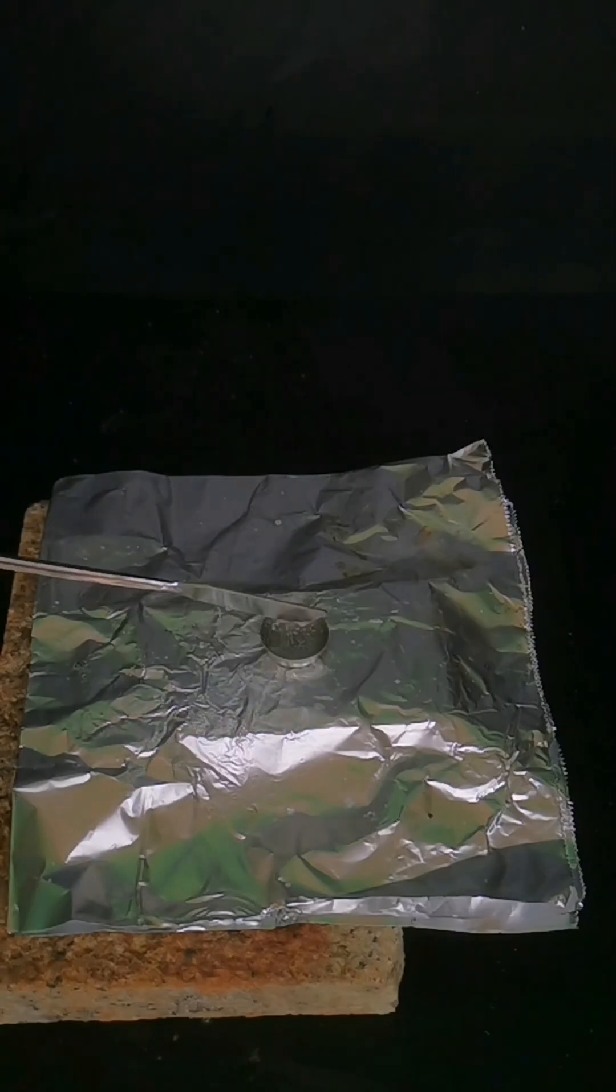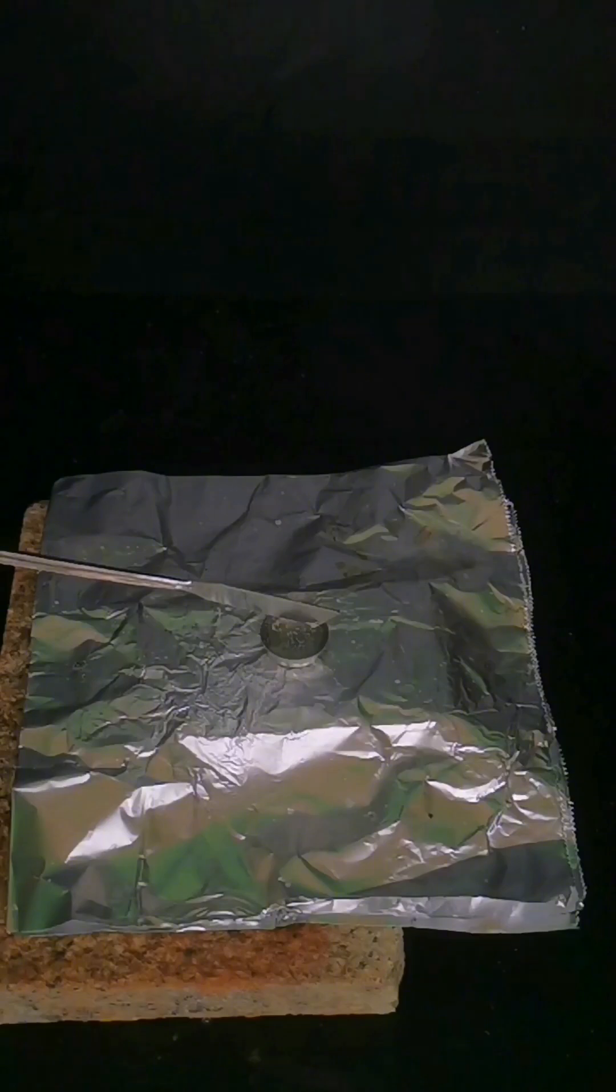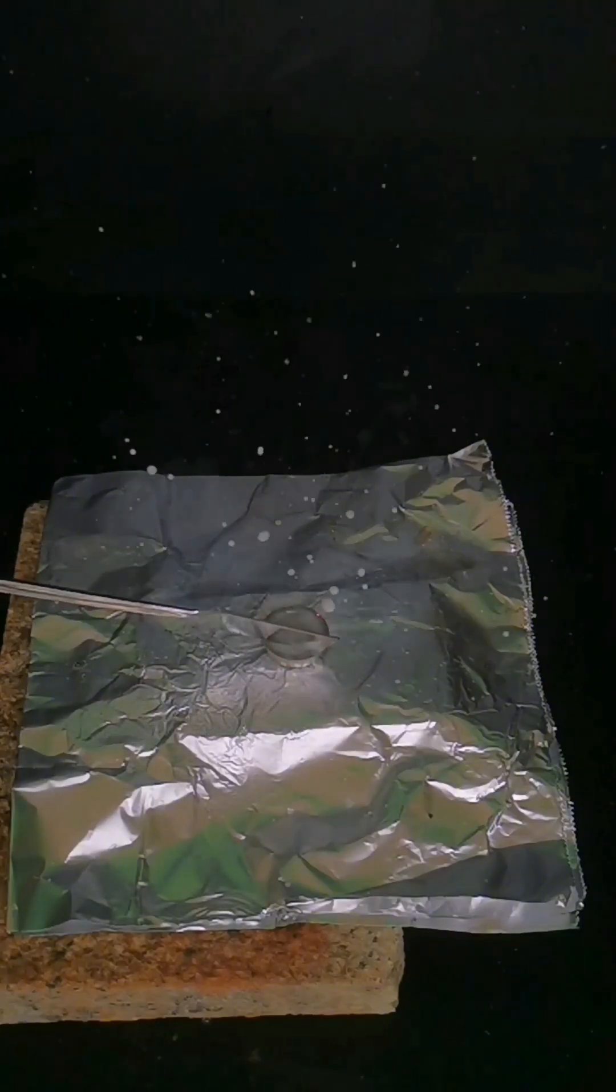Then I will try to add sodium borohydride to hydrogen peroxide. Also a big explosion. I hope you can try to explain why the red flame is appearing in comments.